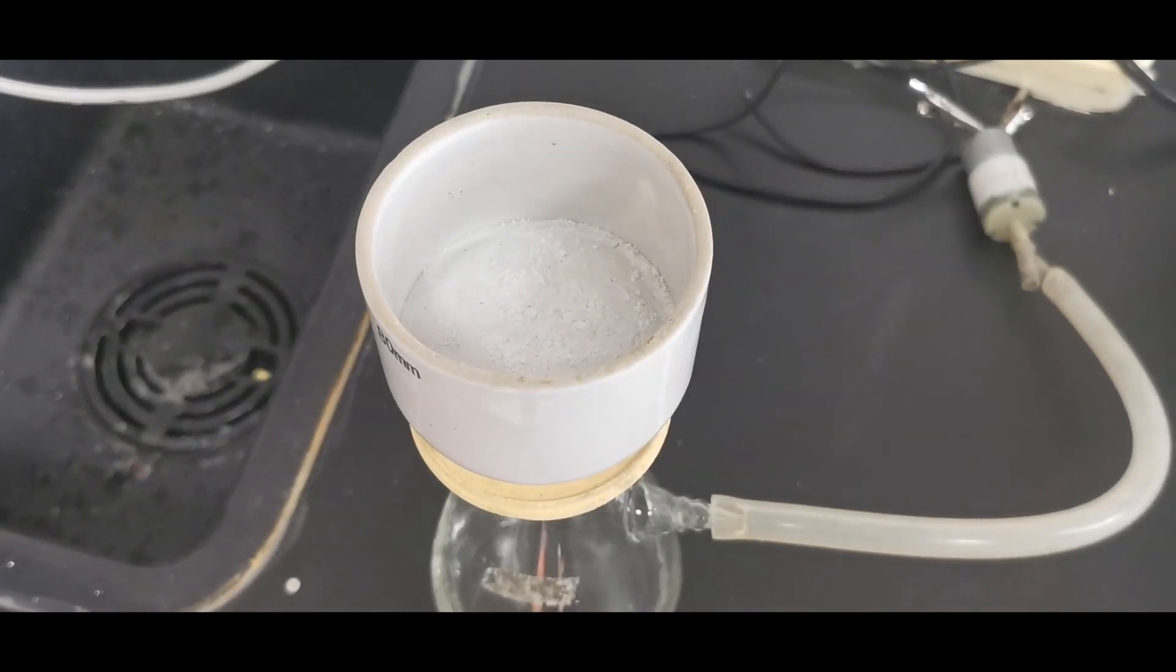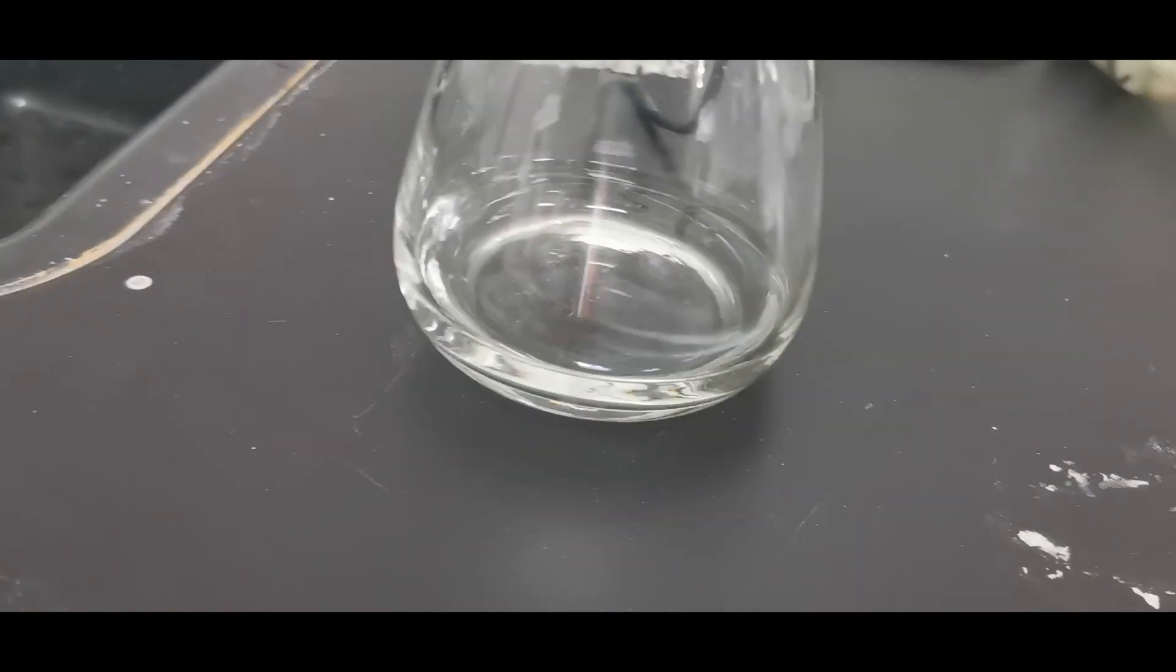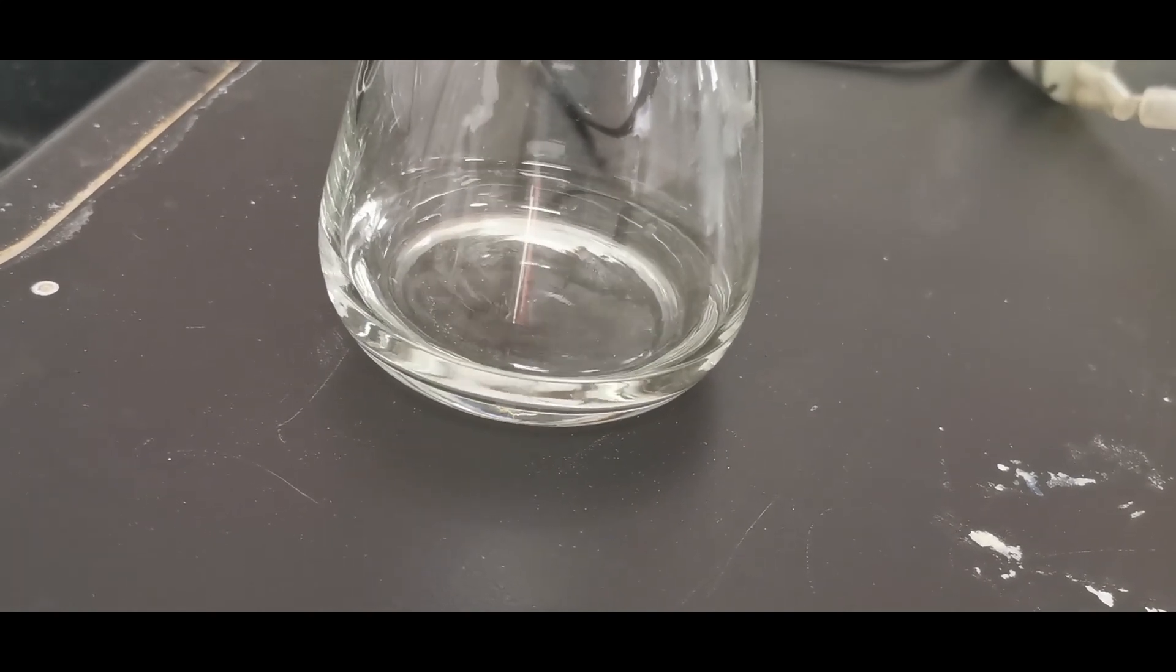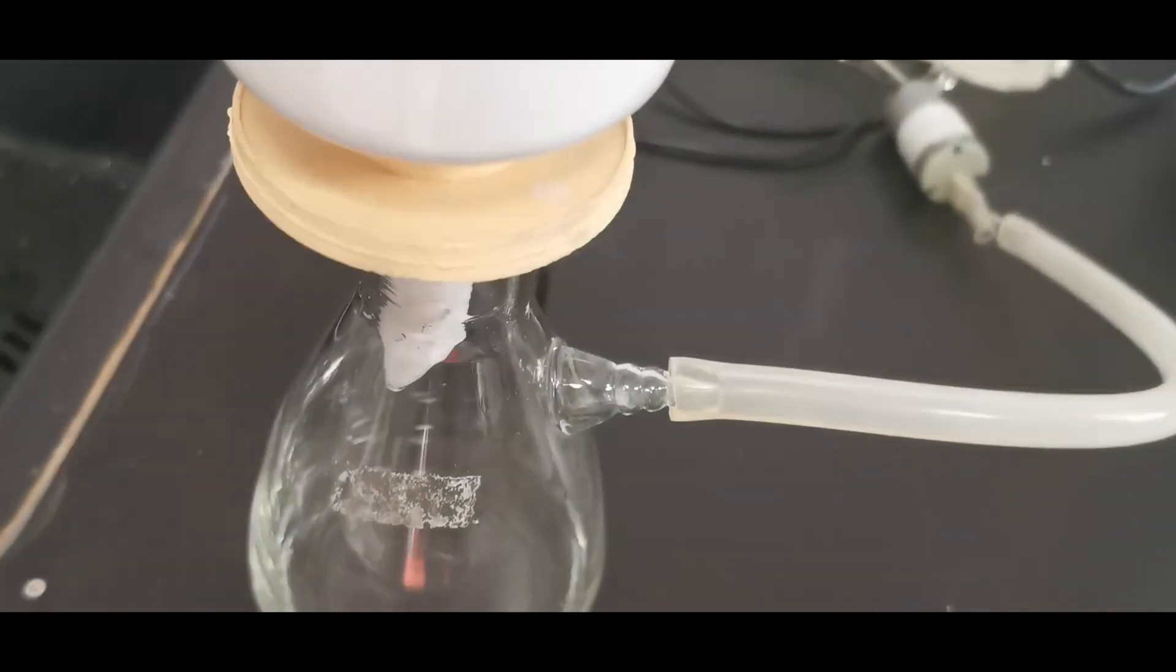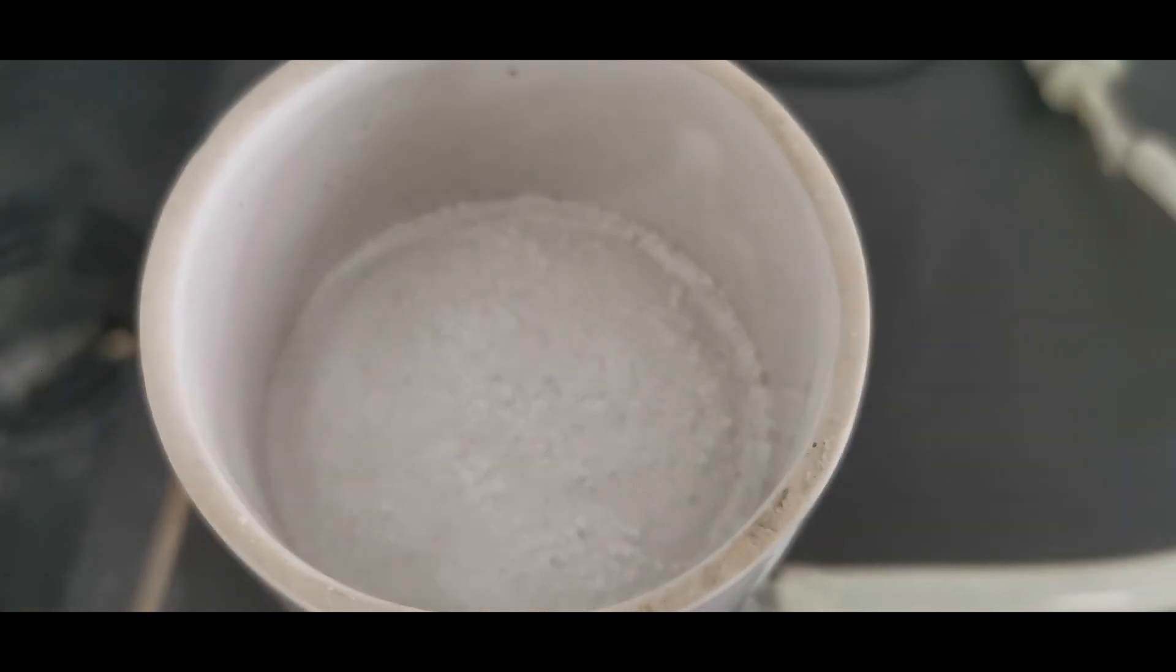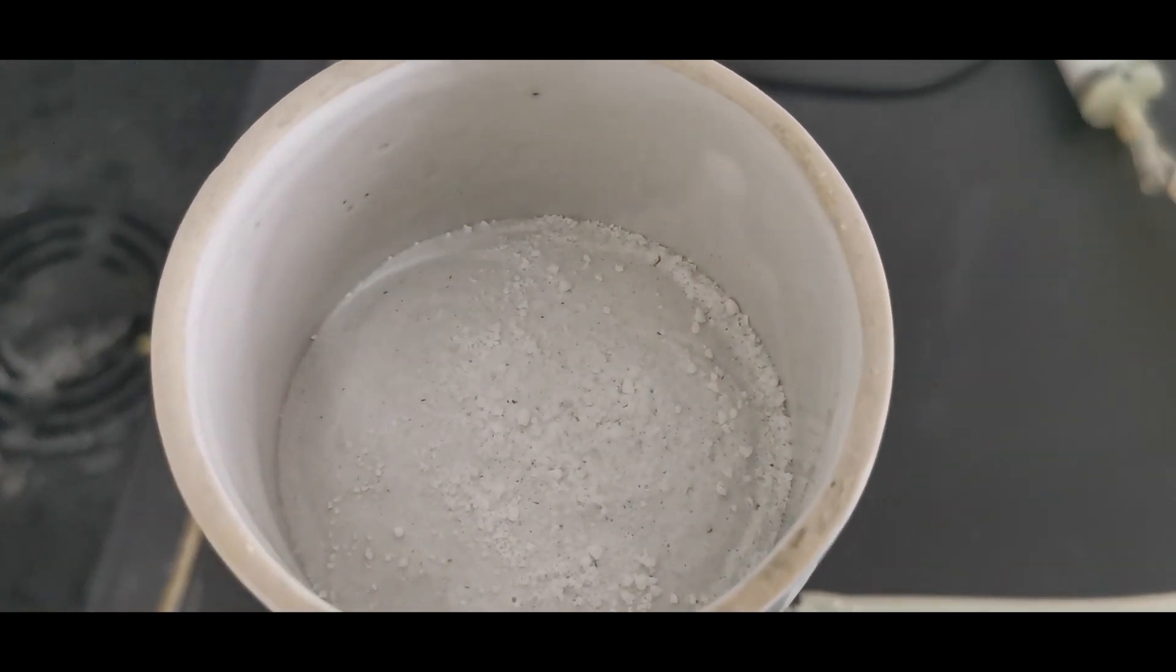After filtration, we're left with a slightly off-white potassium perchlorate product. As you can see, there are some black stuff remaining in it, and you can get rid of them by recrystallization in boiling water. The filtrate is a solution of potassium chloride, chlorate, and perchlorate, which can be recycled to your chlorate cell and produce more perchlorates.